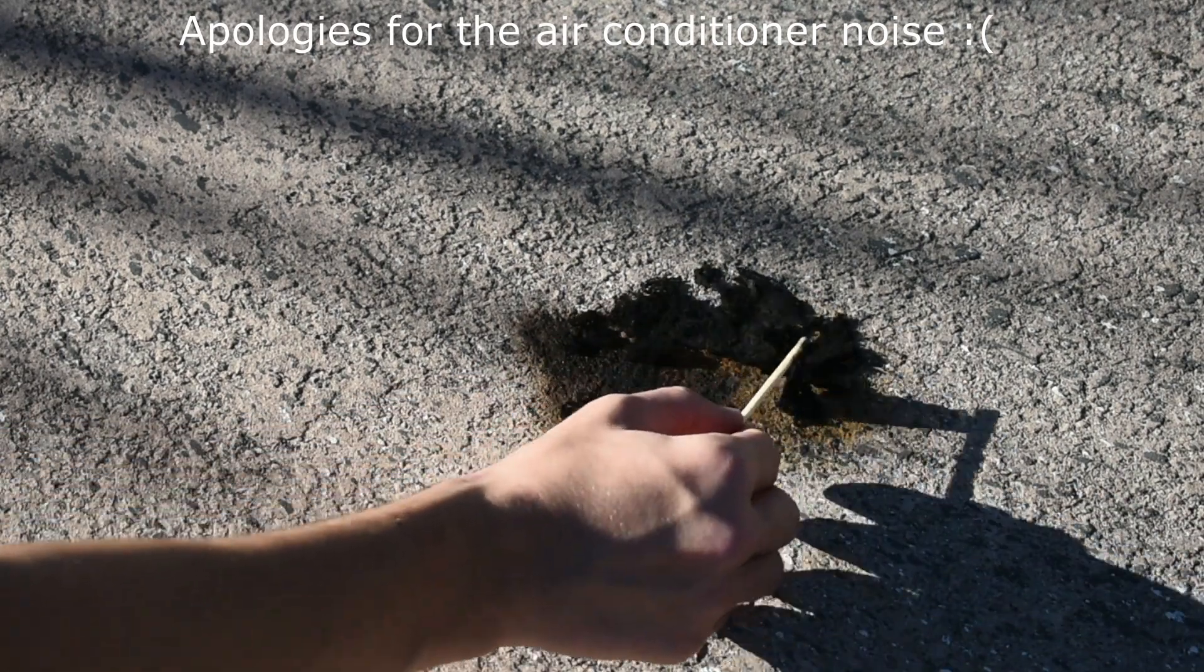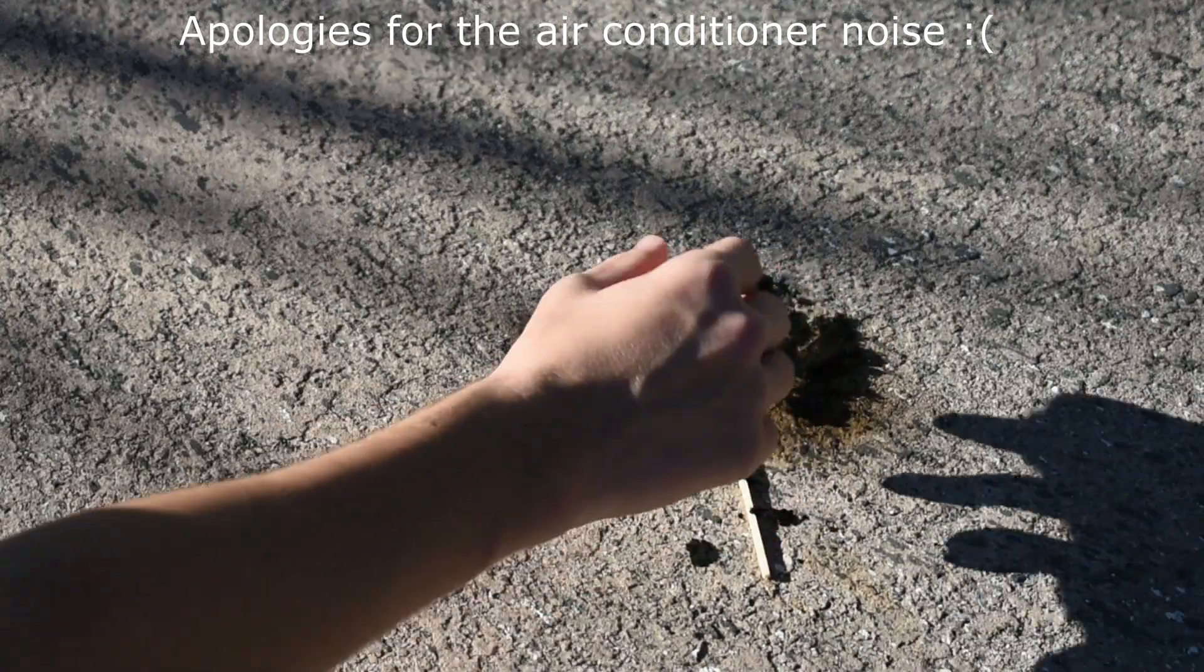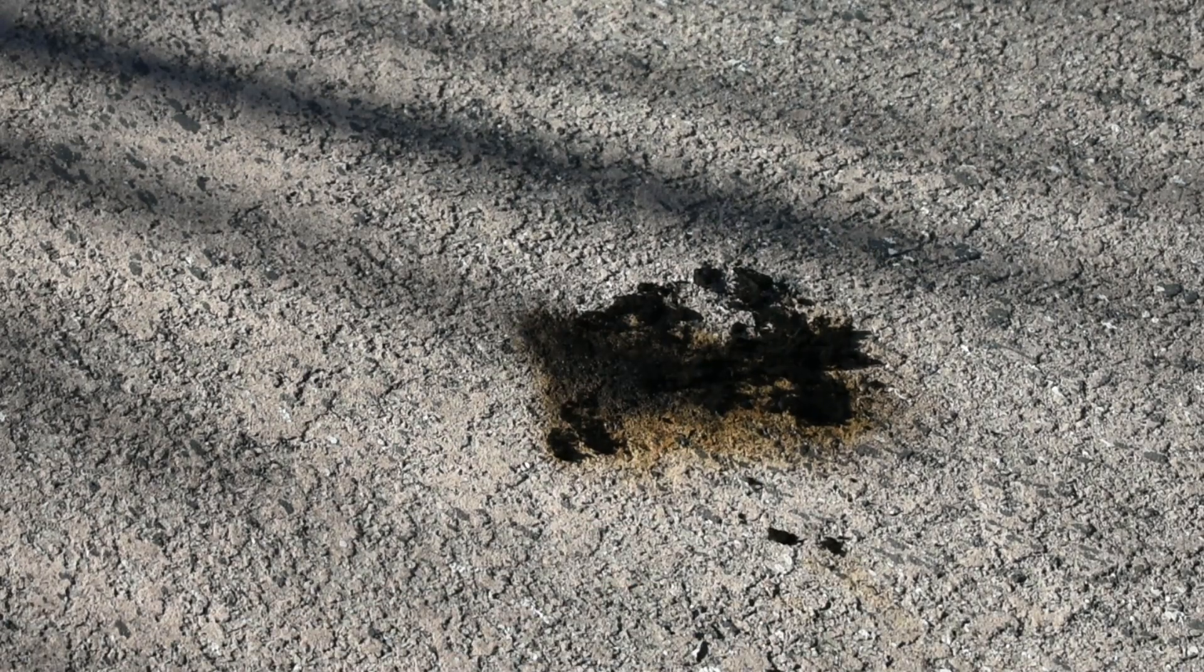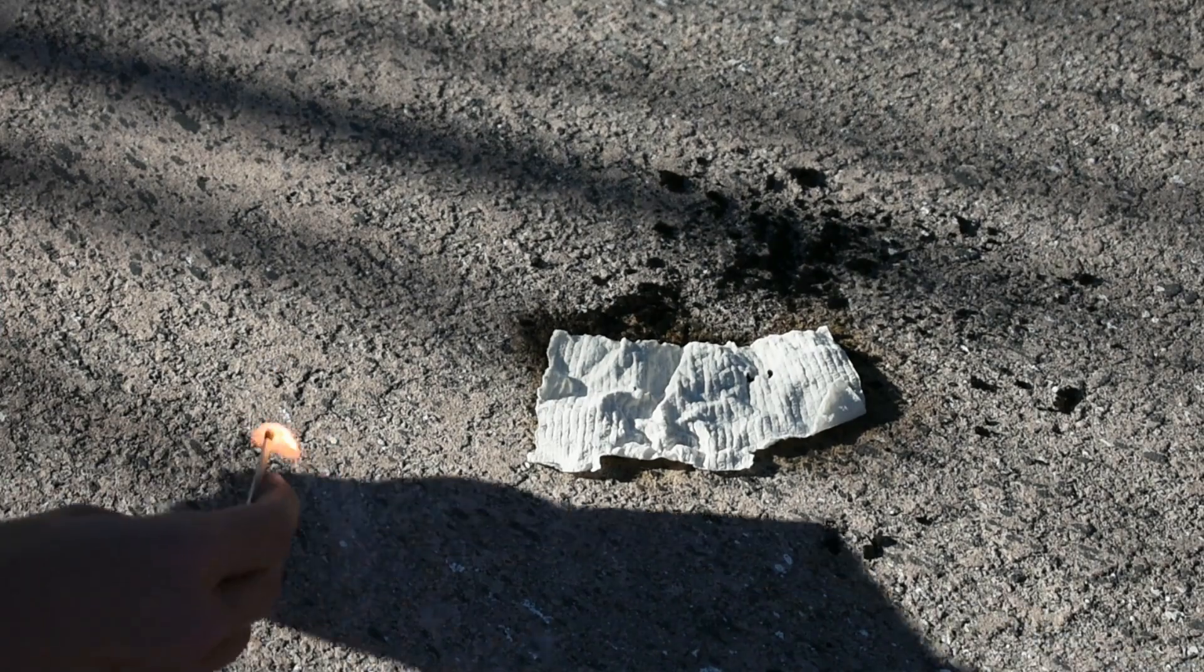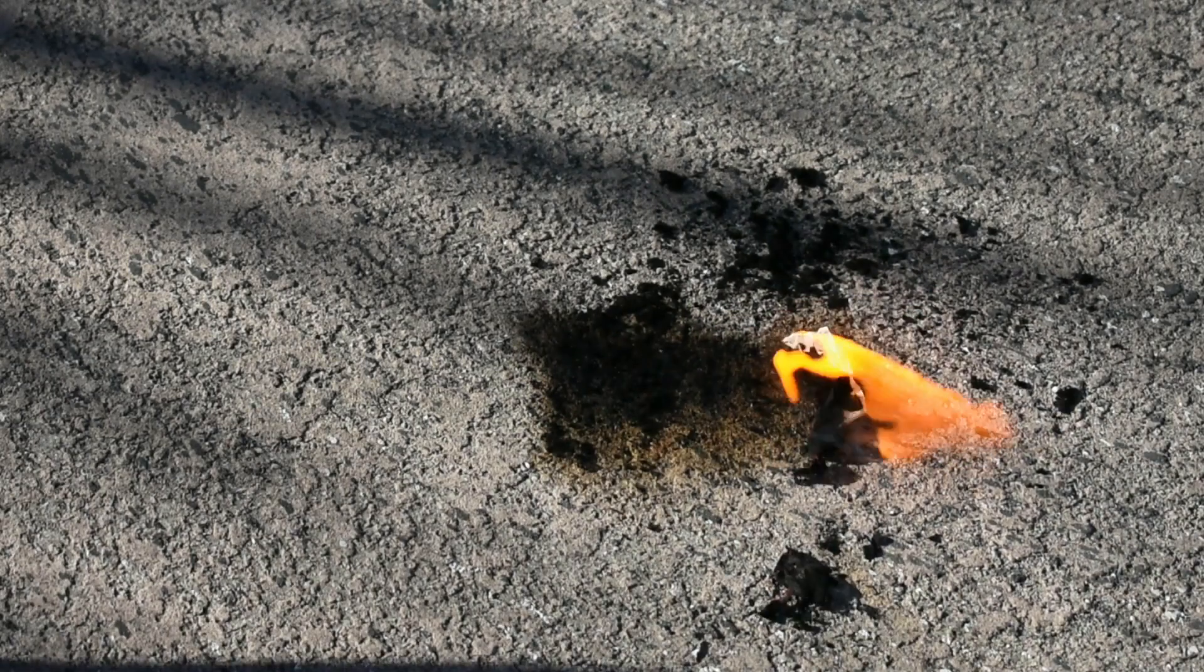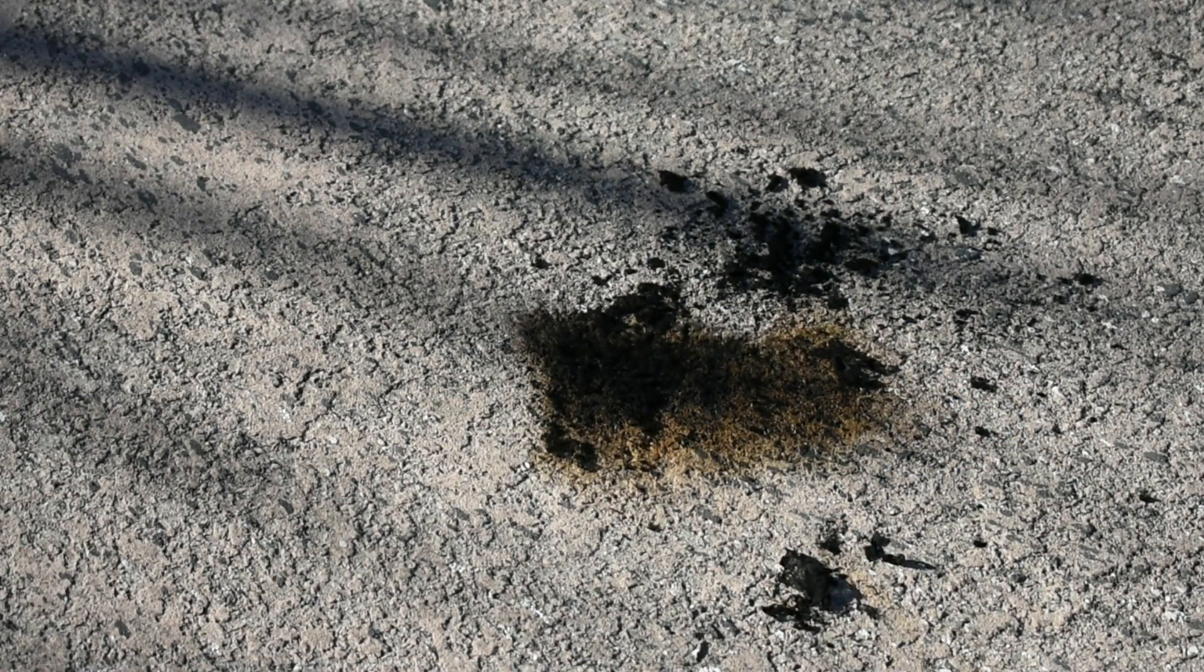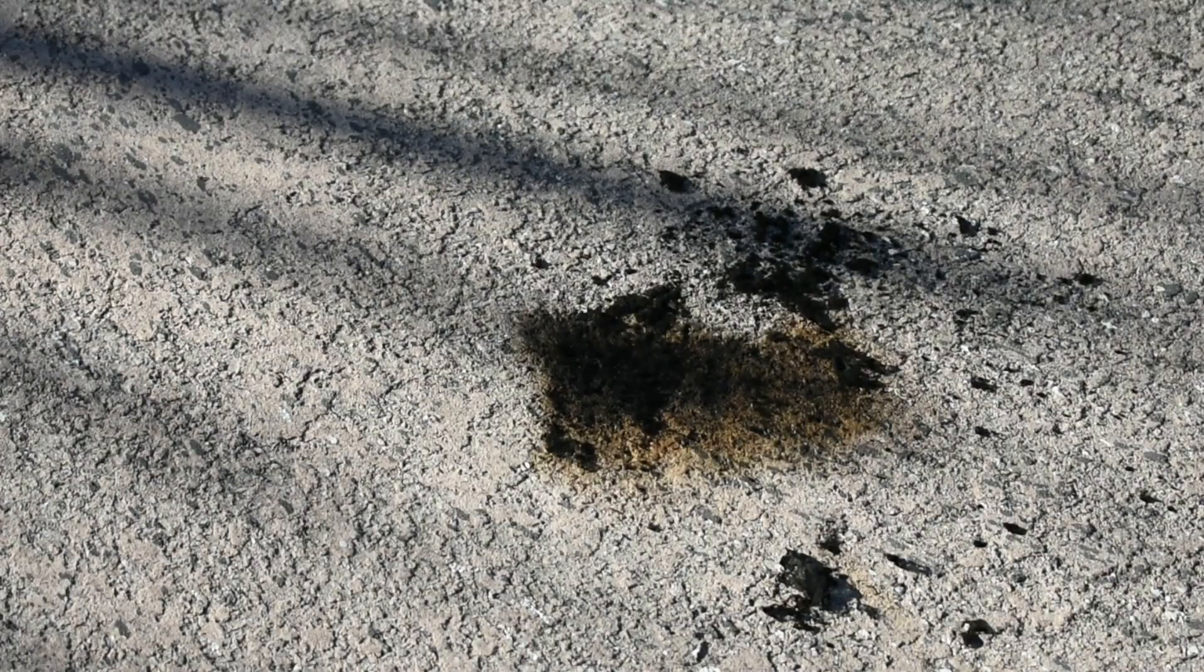And again, it's carbon. It's very thin, it falls apart in my fingers. Can't even pick it up really. I'll try the other paper towel. This one actually burned a lot better, a lot less ash, surprisingly. I'm not sure if it has to do with the actual brand of paper towel, rather more of the length I left it in the nitration solution.